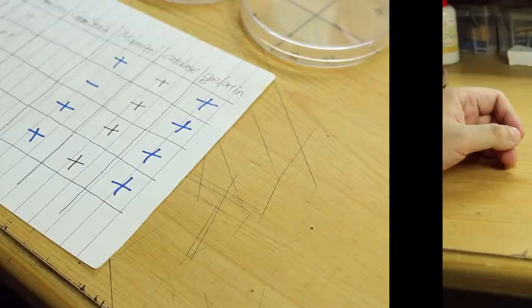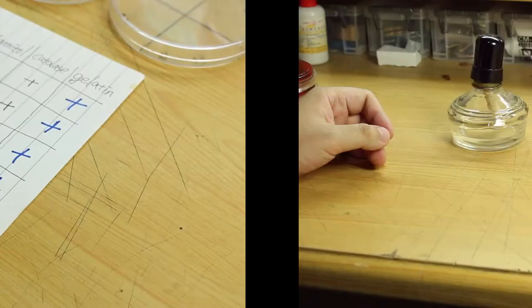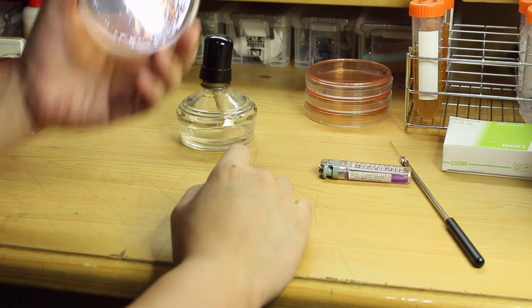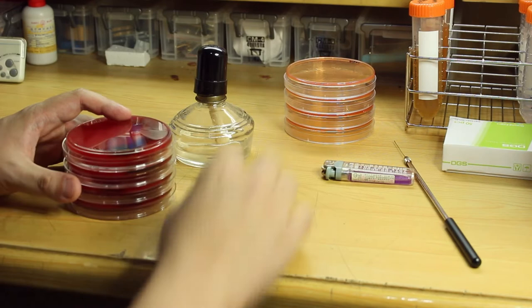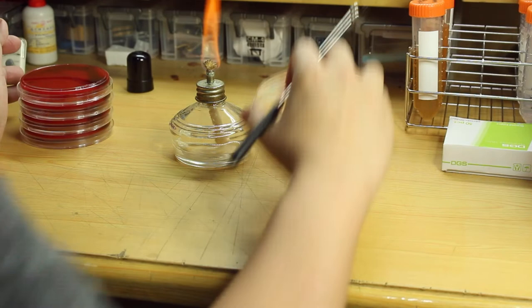The fourth test is the mannitol test, in which I'll be using this mannitol salt agar. This agar contains mannitol and high concentration of salt, which can be used to test two properties of a bacteria: first being if the bacteria can grow in a high salt environment, second being if the bacteria can hydrolyze mannitol and generate acid.